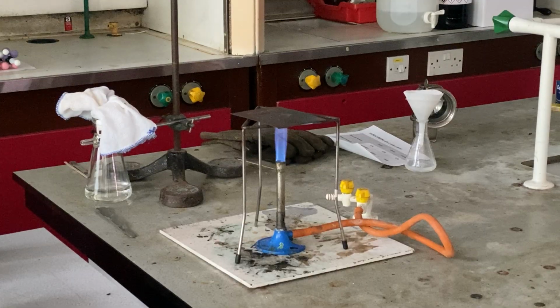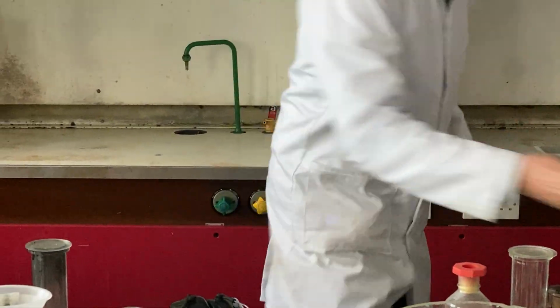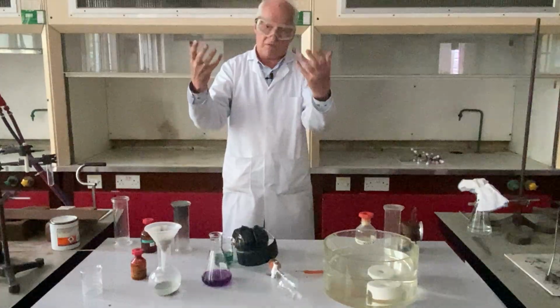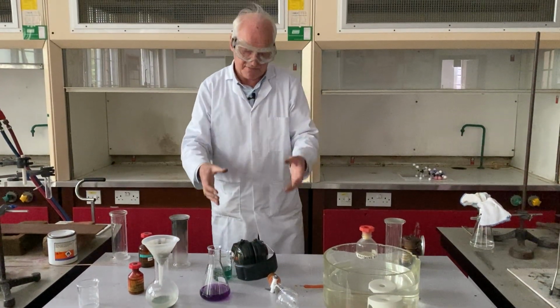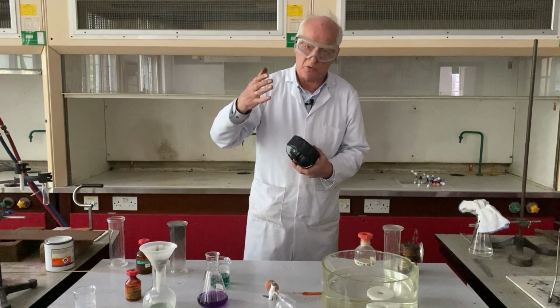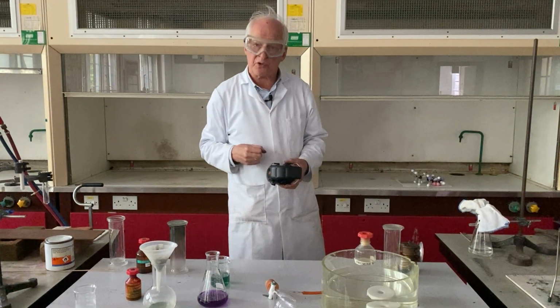I think that was it, actually. So I think we've definitely demonstrated this reaction. If there's a tiny bit more, I may actually come back to that later. But it worked, basically. You saw a flash and you heard a bang. This is a bit of hit and miss. It depends on how the substances were prepared. But in essence, you saw a definite, very rapid reaction.